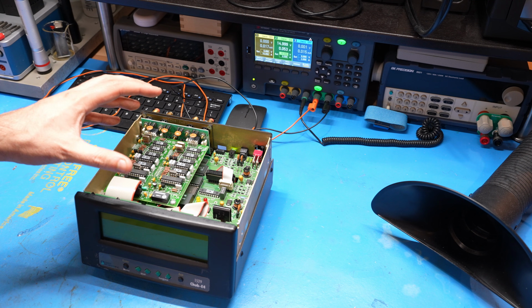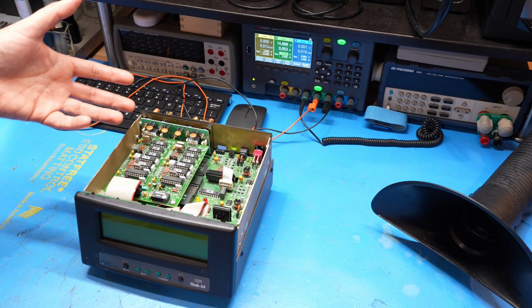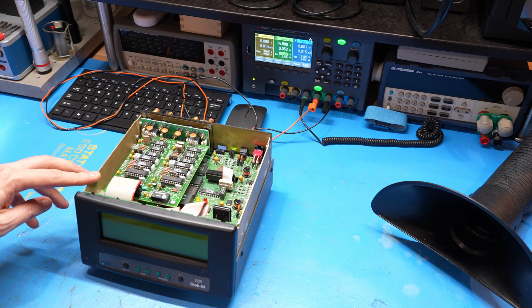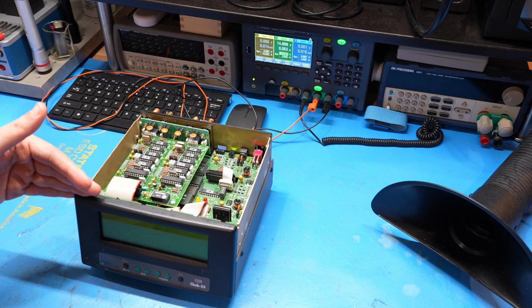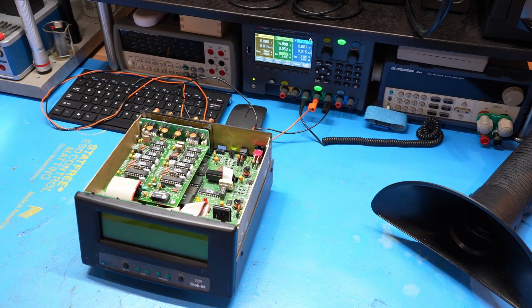Another symptom that I notice is that it does have a squeaky sound coming from it, which is very much a telltale of DC-DC converters, and there are not that many DC-DC converters on this, so I'm going to take a closer look at them, and that might be part of the problem. If there's a short after the DC-DC power supply, or there's some other issue with it, that could be causing that. So let's do further investigation there.